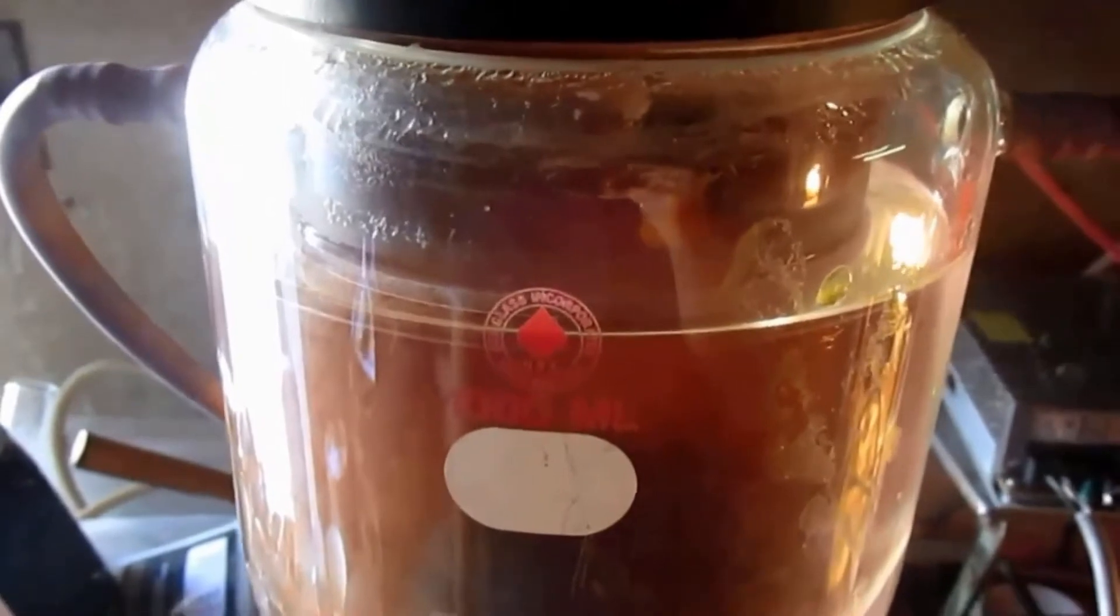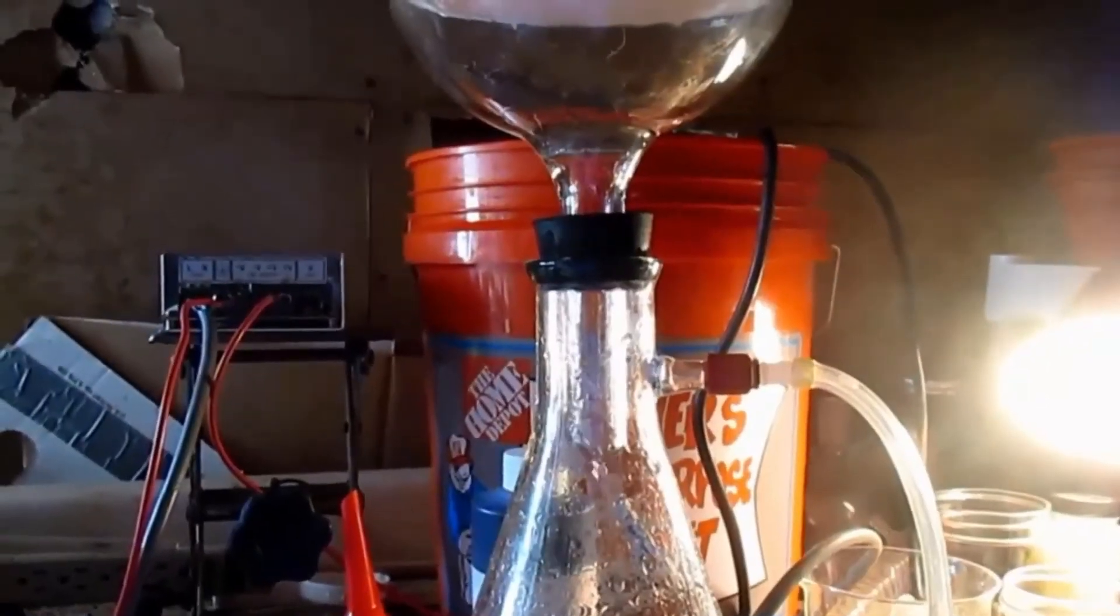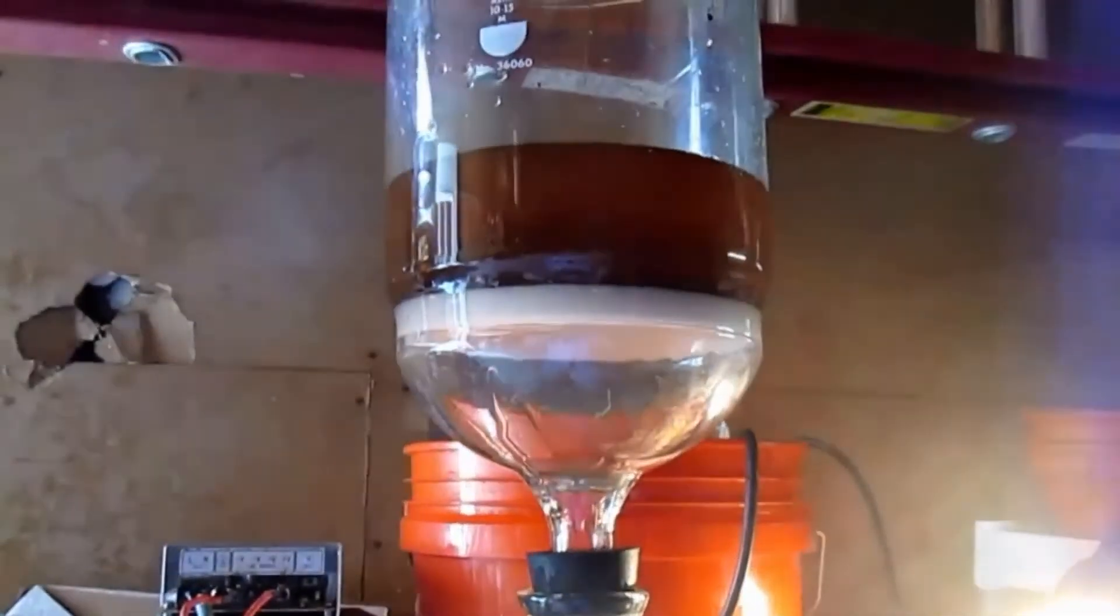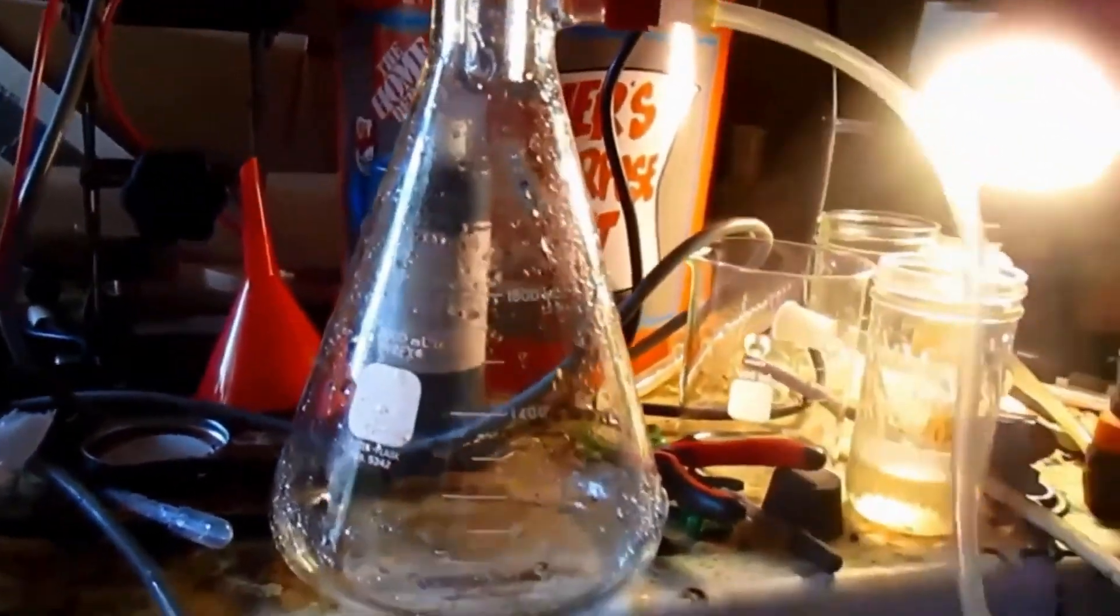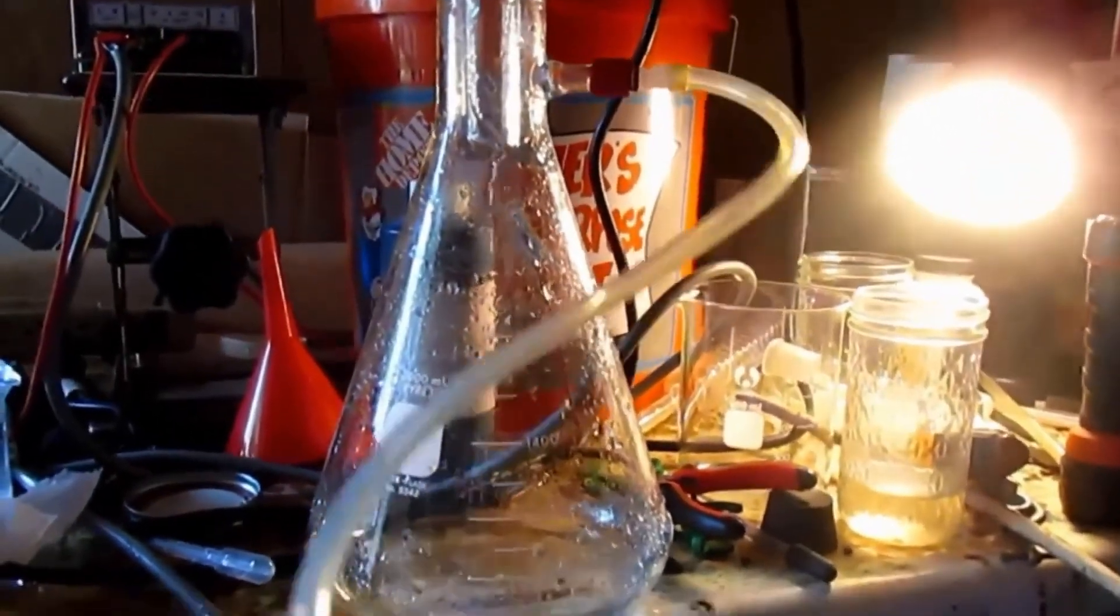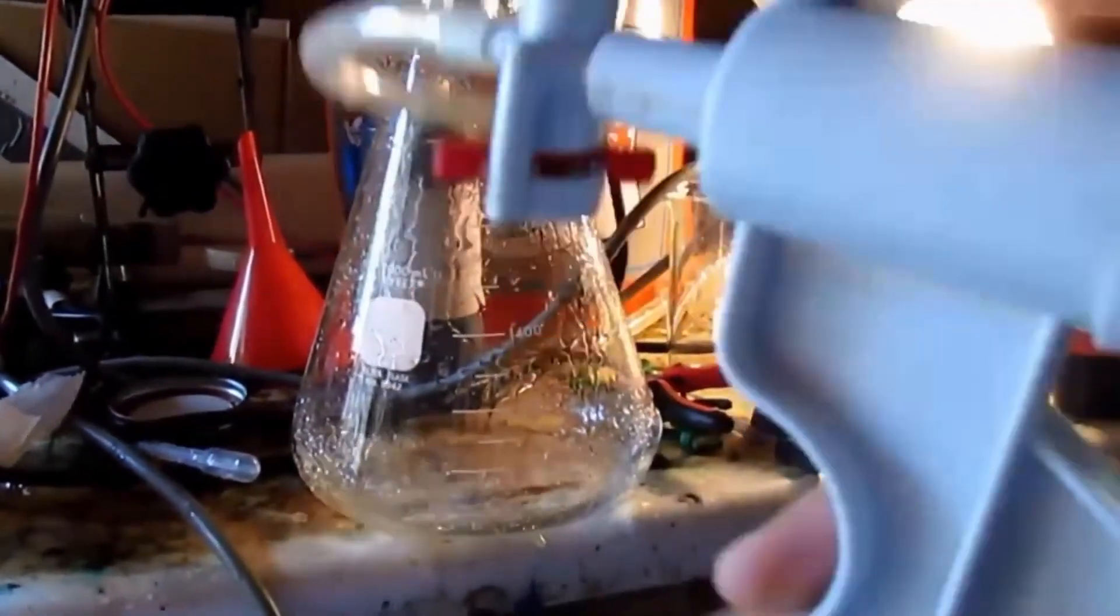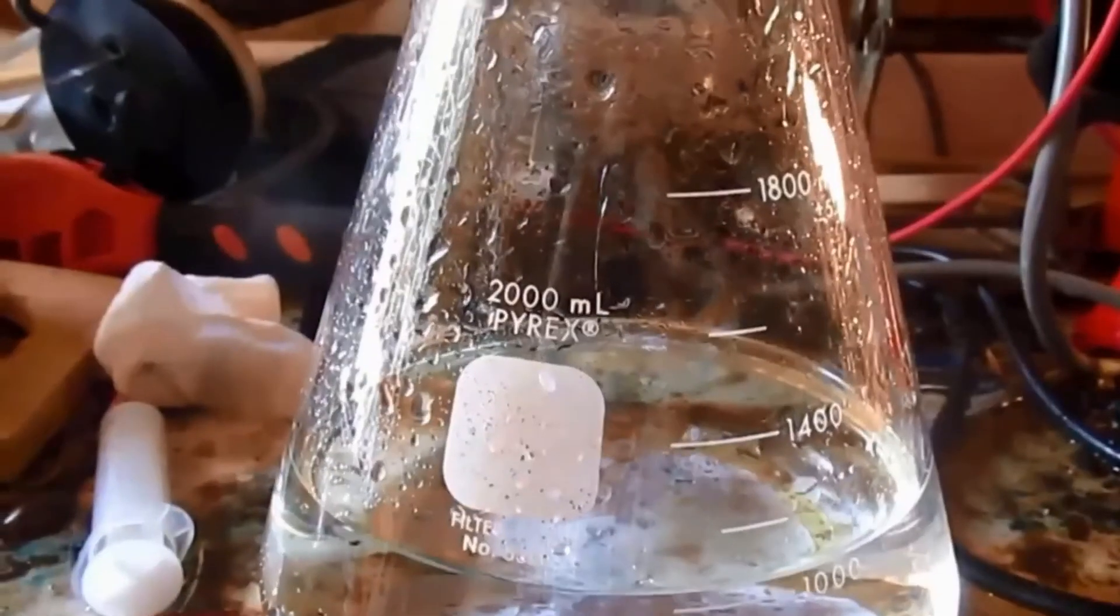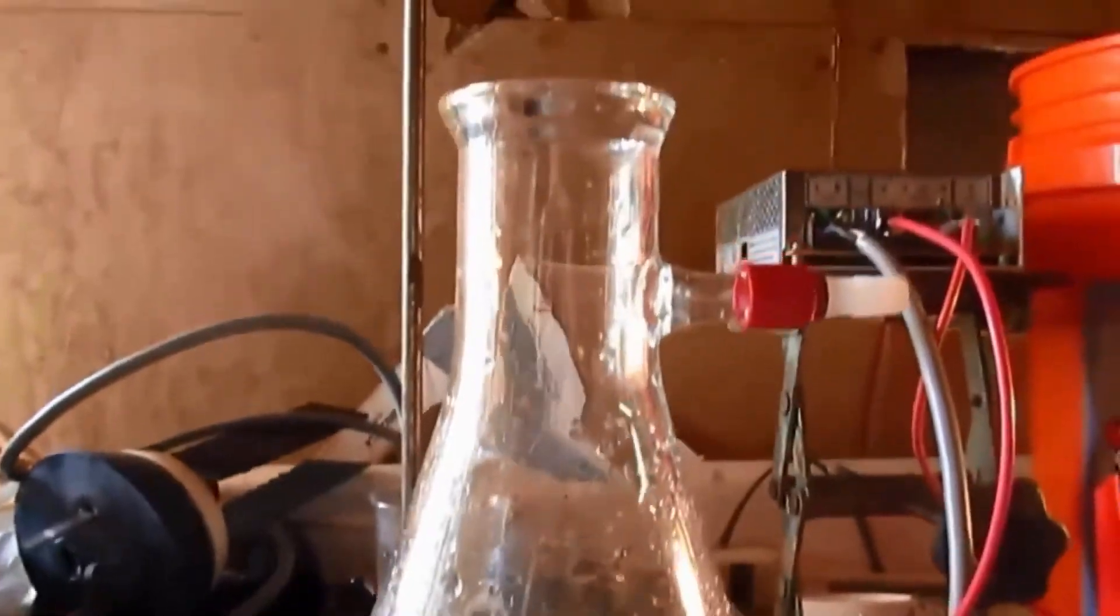The solution was transferred into a large size Buchner funnel. It is now ready for vacuum filtration to remove the insoluble lead dioxide particles. After filtration, this is the result: a clear solution of mostly sodium perchlorate.